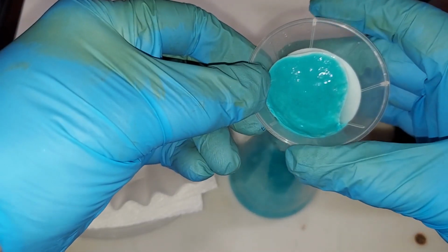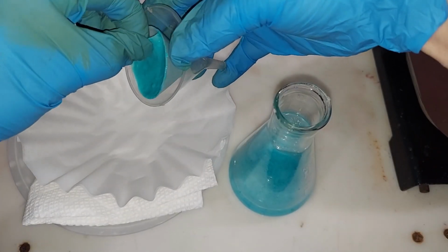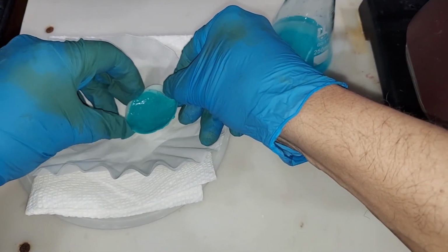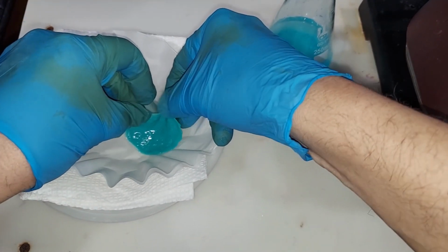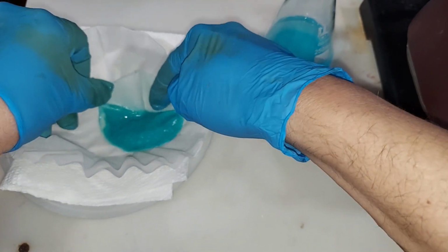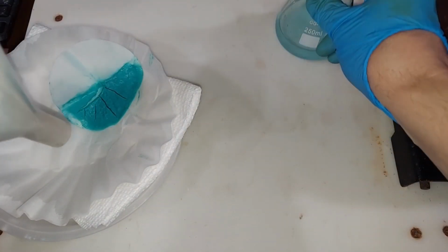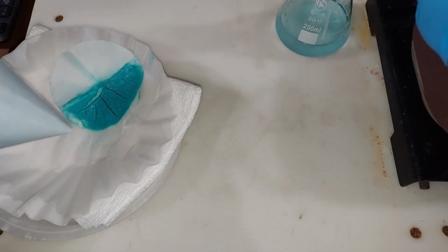Okay, it's not completely dry, but it's definitely far enough. It's pretty much stopped dripping. I'm going to open this up now over here. We basically have copper carbonate sludge here, but that should start absorbing the water pretty well. The second batch has now been washed 3 times also. So we're going to get rid of this, pull out the filter paper, and start drying it too.